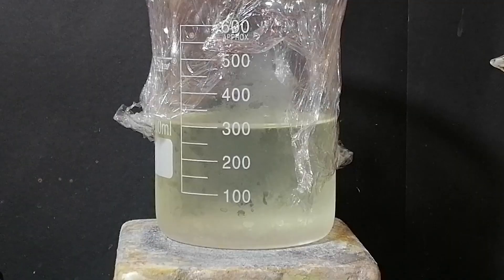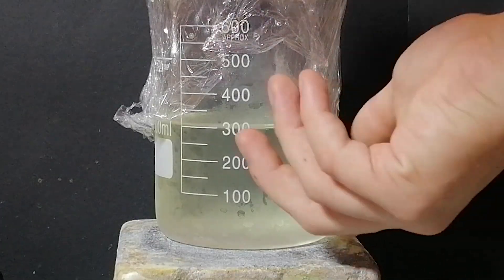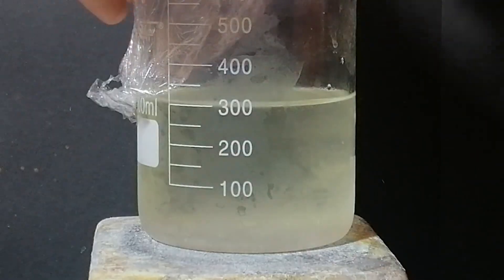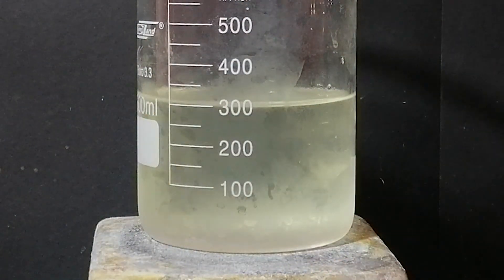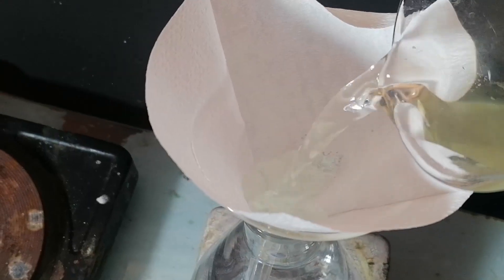The next day something crystallized, however, I think it's hard to see on camera. But if you really squint your eyes, the white color on the bottom of the beaker are chlorate crystals. The whole thing was stirred and then filtered. Then I've left it out in the sun to dry and voila. Here's the biggest chlorate crystal in the batch.